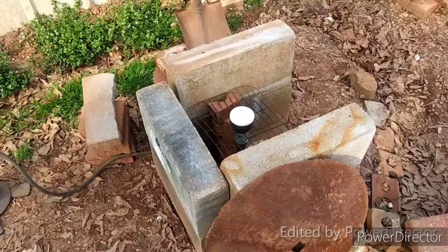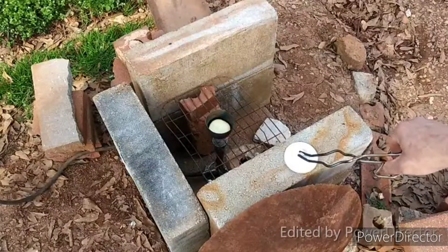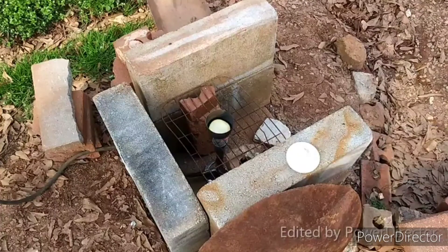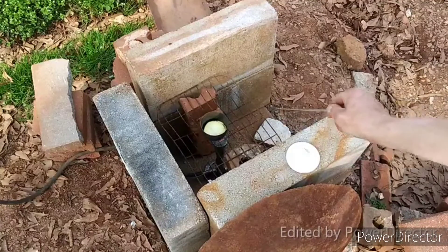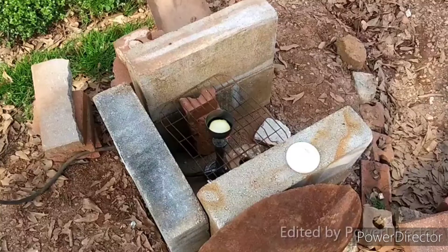It will turn black first and then it will melt, and once it's molten I guess that's the sign to know that it's done. They said that it would take about 15 minutes, so here goes nothing. You can see it's kind of turning black around the edges there. I don't see how that can possibly be a good thing — wouldn't that just be from decomposing ferrocyanide? I don't know. I didn't stand this close to it yesterday.